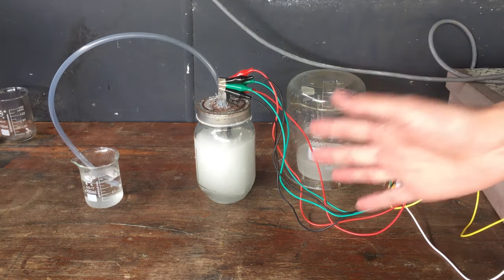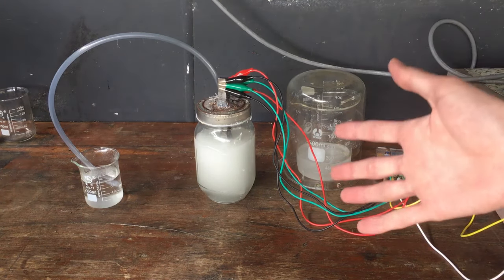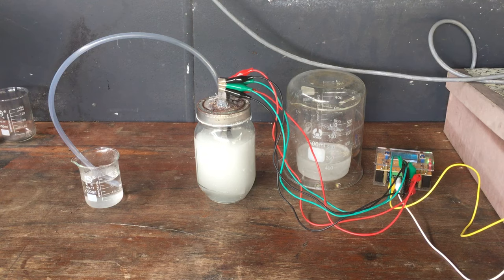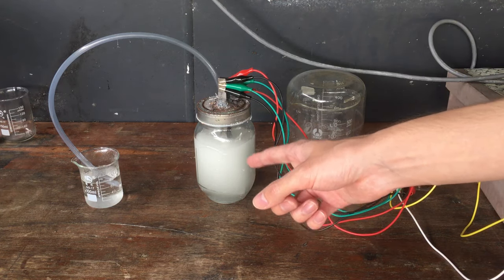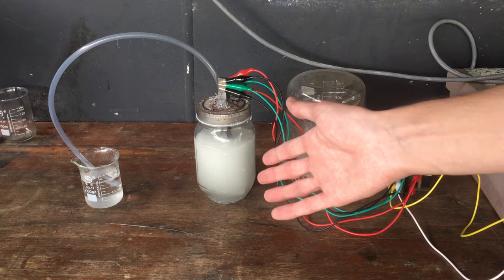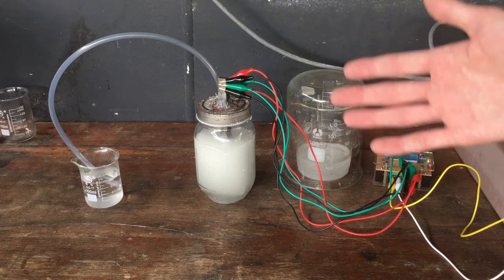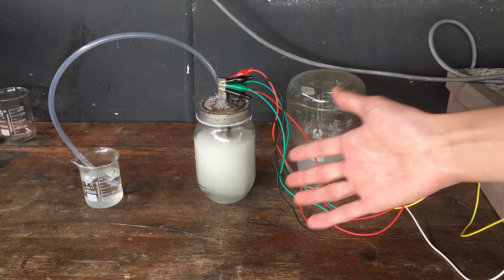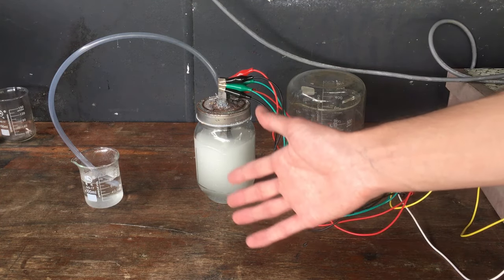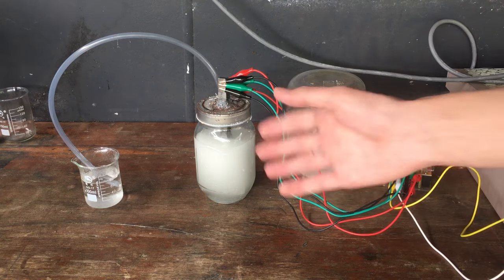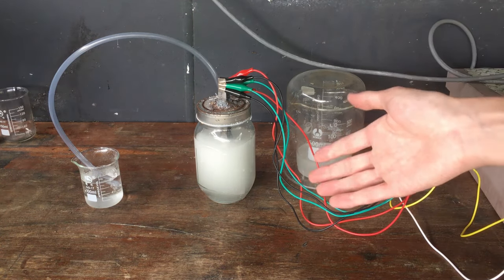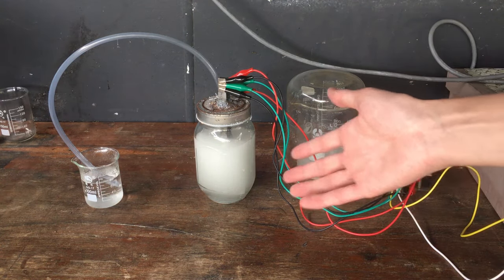16 days it has now been since I started running the cell. I didn't film any of it, but things got quite complicated in the middle there. What basically happened was before all of the sodium chloride dissolved into solution, unexpectedly the sodium chlorate started to crystallize out, which I wasn't expecting. I thought I was being really cool and calculated everything using solubility products to see when all of the sodium chloride would dissolve and when all of the sodium chlorate would start crystallizing. But apparently I must have got my calculations wrong, or maybe my theoretical calculations just don't apply under these physical conditions.